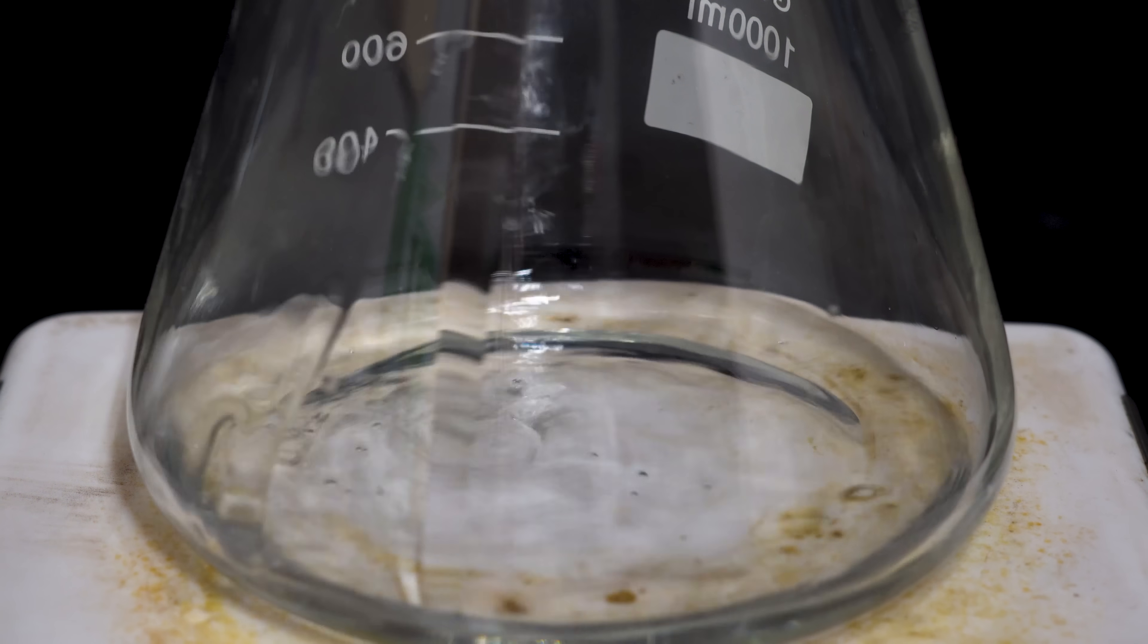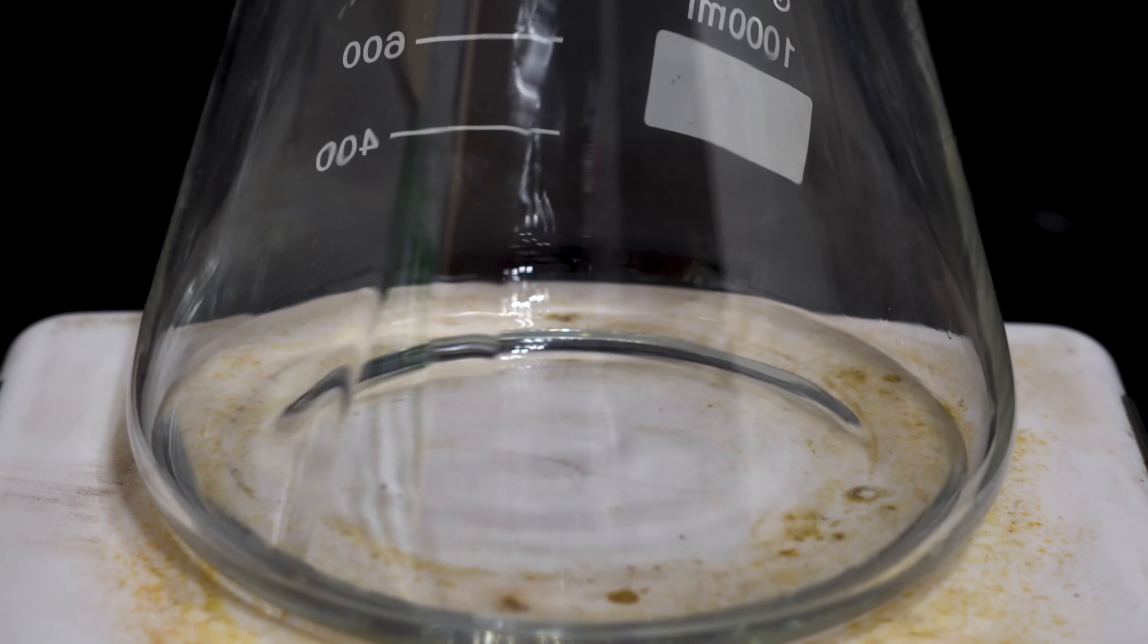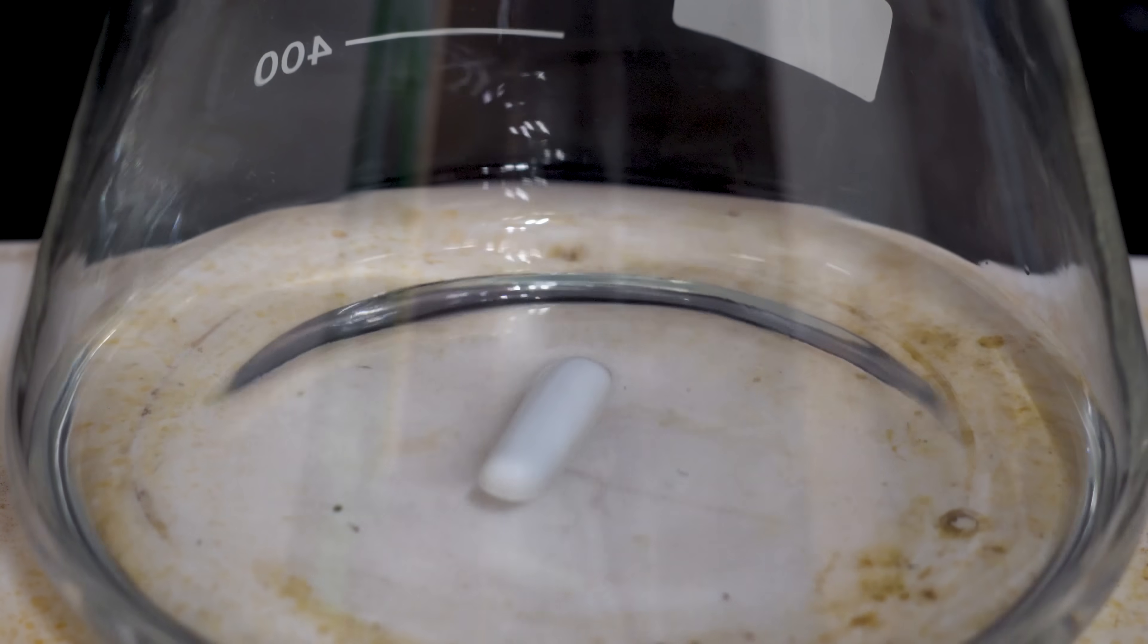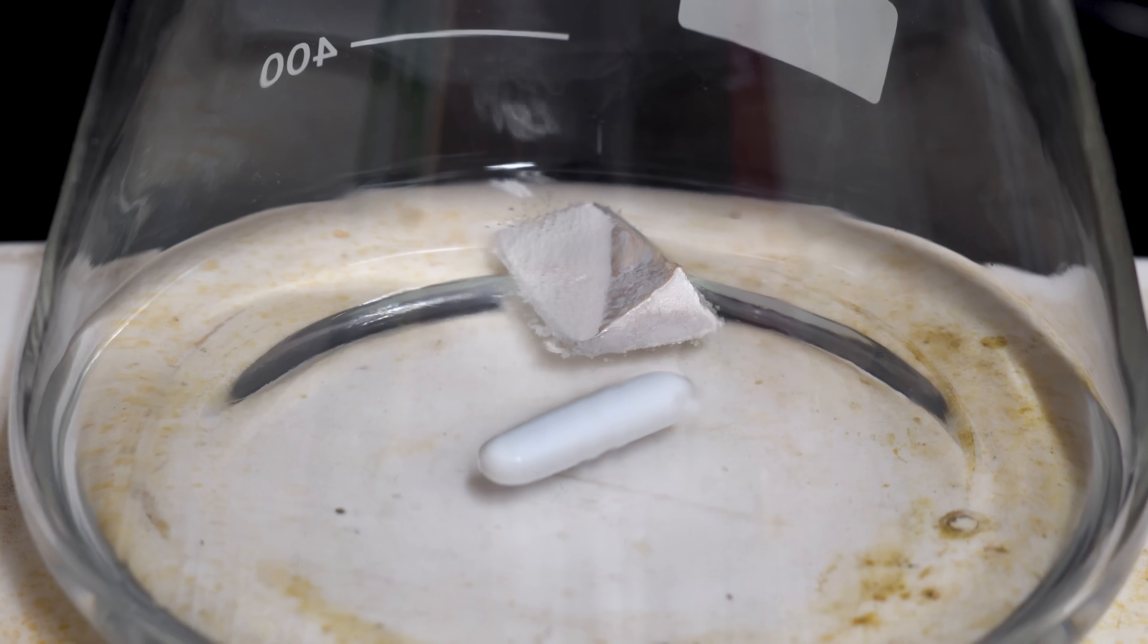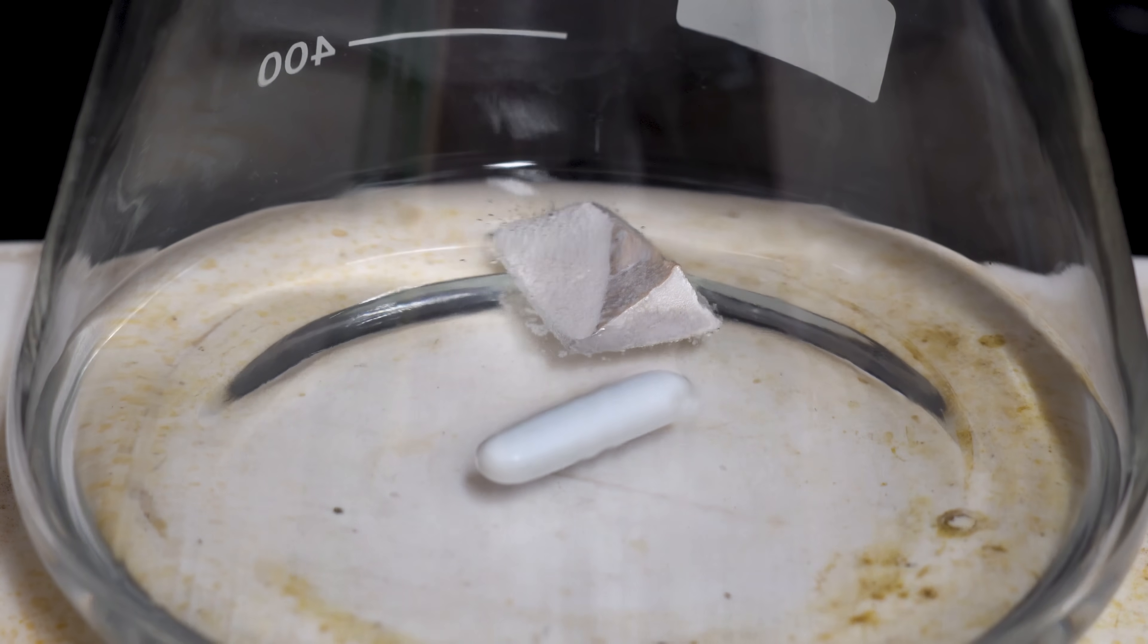To make the sodium ethoxide, we're first going to need some anhydrous ethanol and I decided to pour some into an Erlenmeyer flask. I also threw a stir bar in for fun.